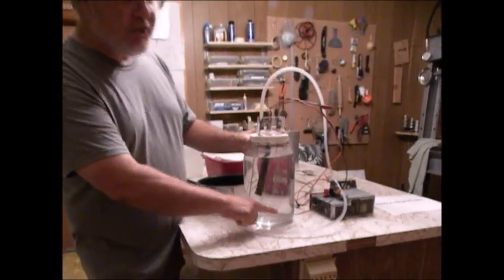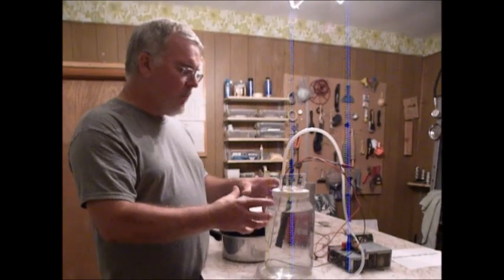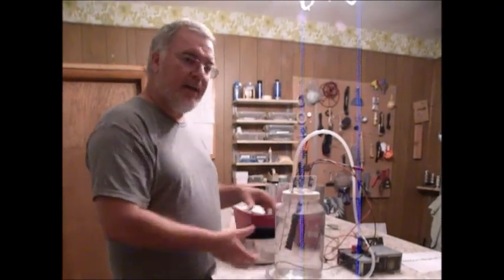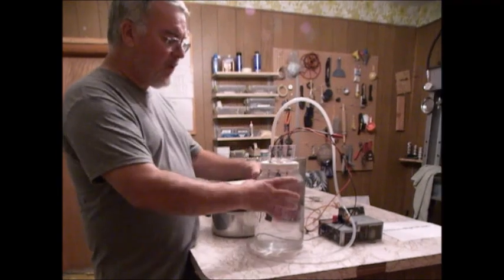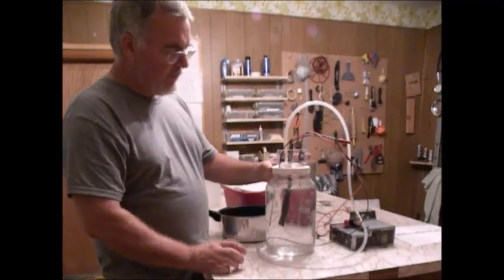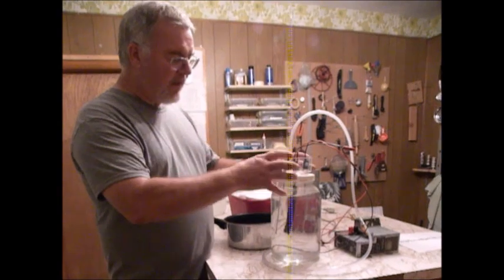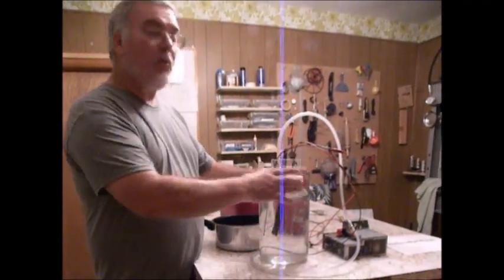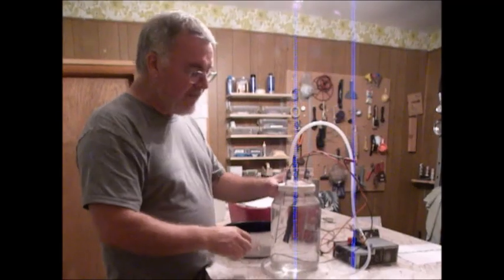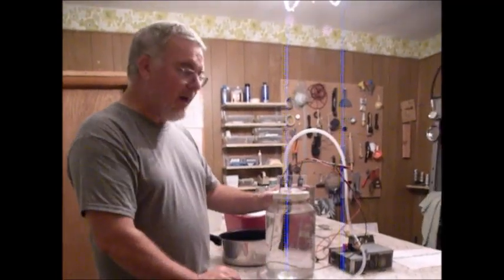But if you get, you know, when it cools down, if you get about an inch to inch and a half of salt crystals, that's going to be right when you're ready to use that product again. Put it in your pan, bring it to a boil, and then put it in your cell, switch out your cells and put it in there. Because again, the salts need to be dissolved in solution. The cell will keep it warm enough that that won't be an issue. But otherwise you're going to end up with salt crystals in the bottom.